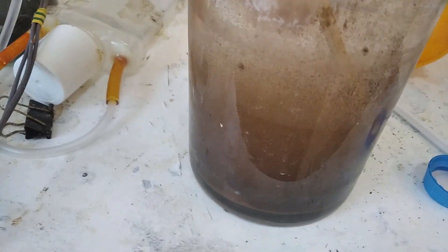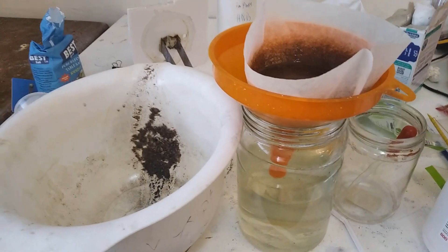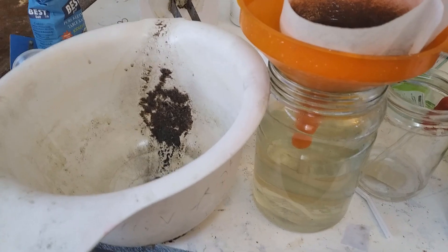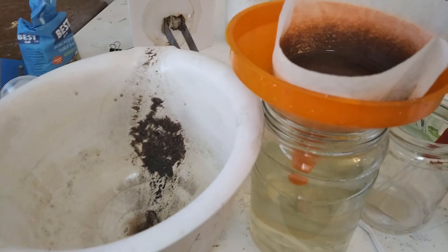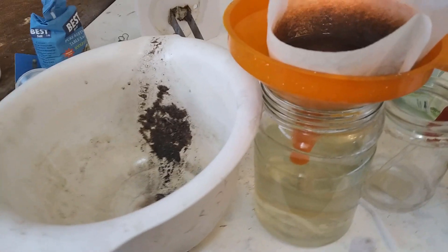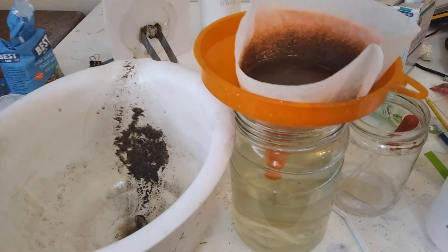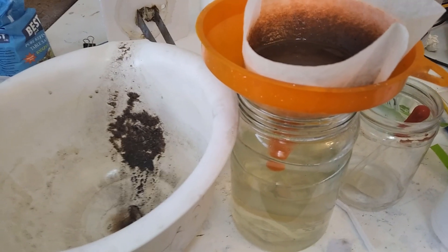Here's our end solution - it's clear except I've disturbed the bottom. Since there's a lot of magnesium sulfate added, it's all flocculating out. The only thing I have to do is filter. This yellow color is from the stainless steel electrodes that can mess with the color of the solution - it's not bleach. The erosion mostly occurred due to bad construction. This was never meant to run perchlorates - I was just too lazy to get a different cell and set it up correctly. If you run your electrodes within 200 milliamps per centimeter squared you should be fine. In fact, 150 is good enough for perchlorate. I was probably running closer to 300 because the electrodes were sagging and my current density loading was off on one side.